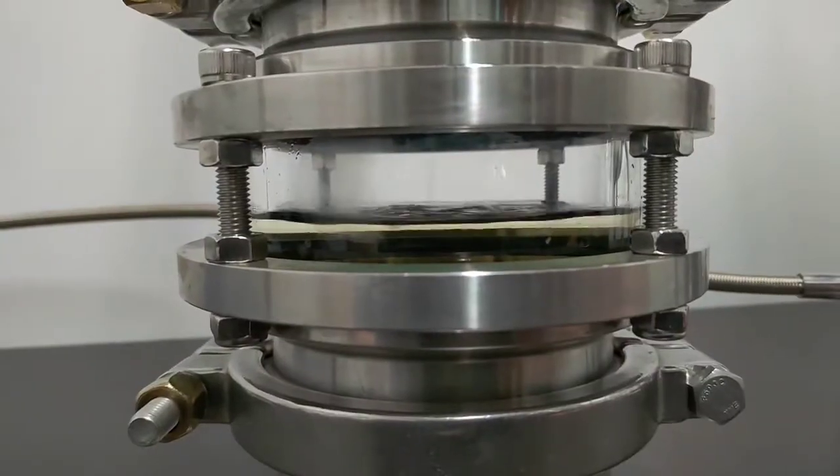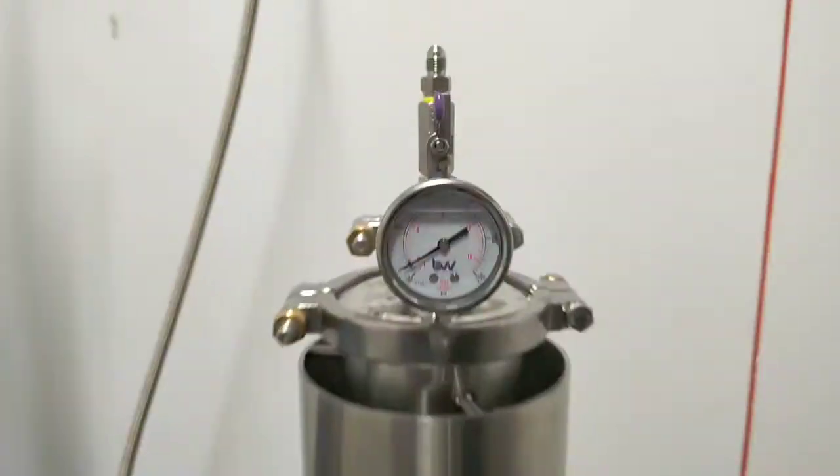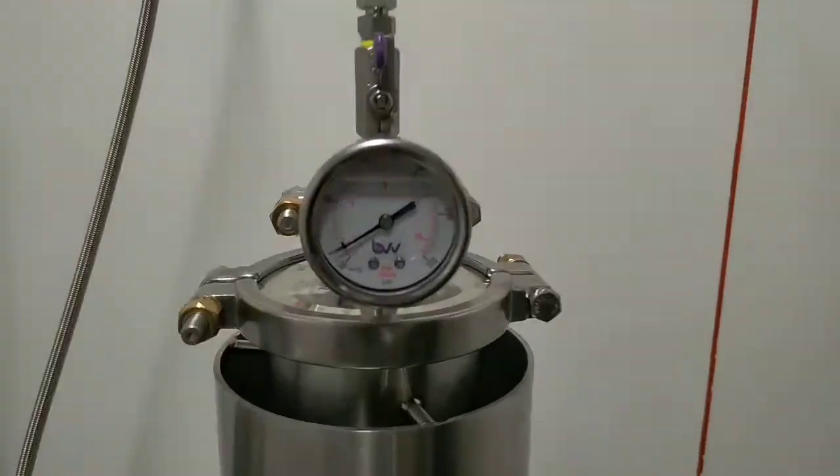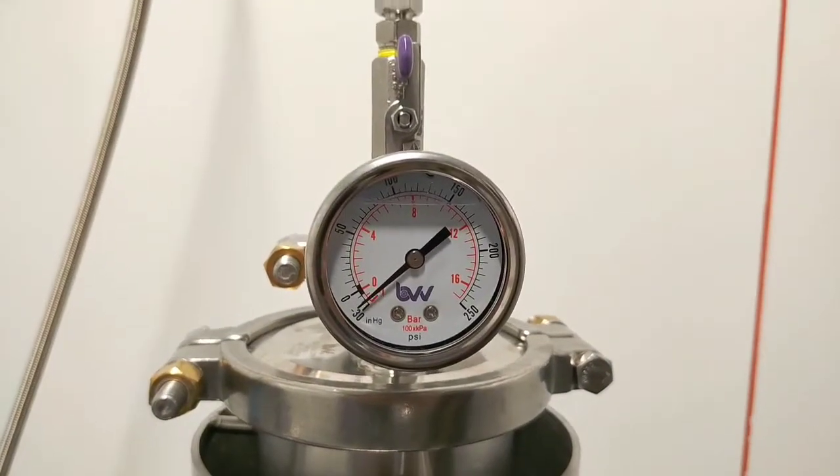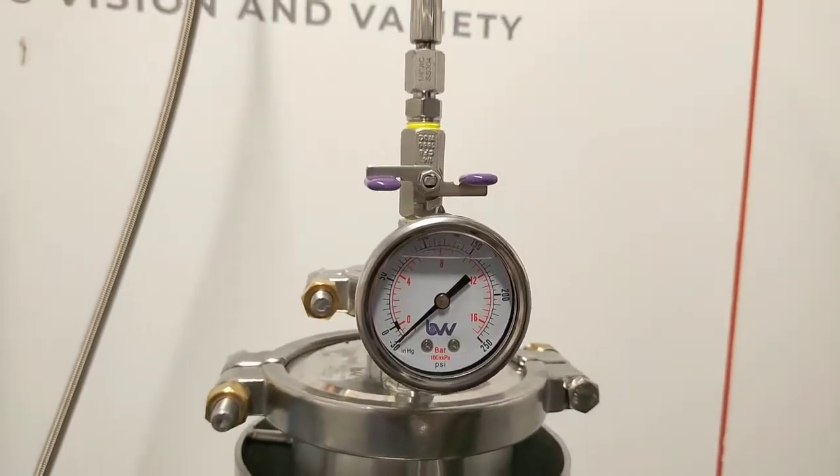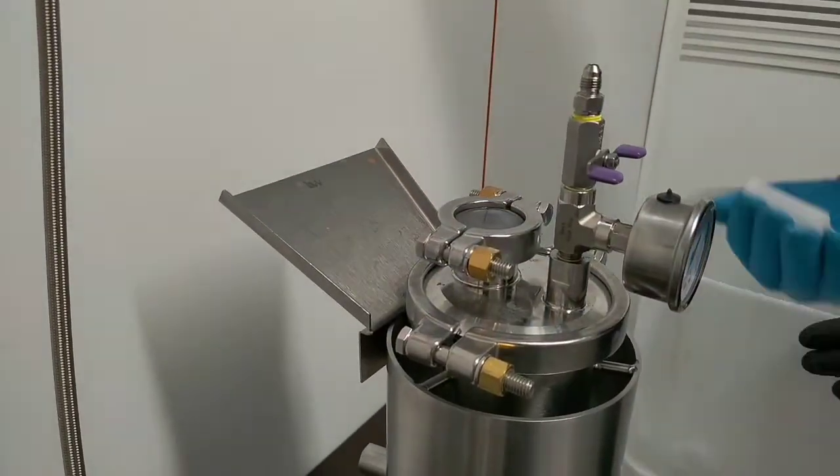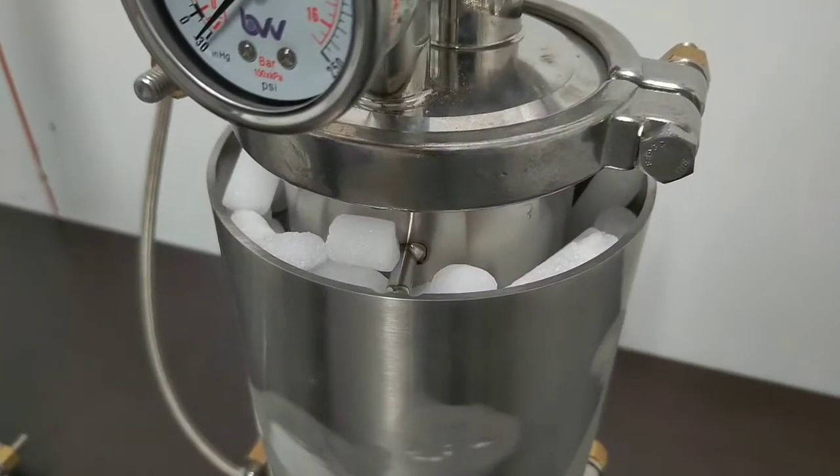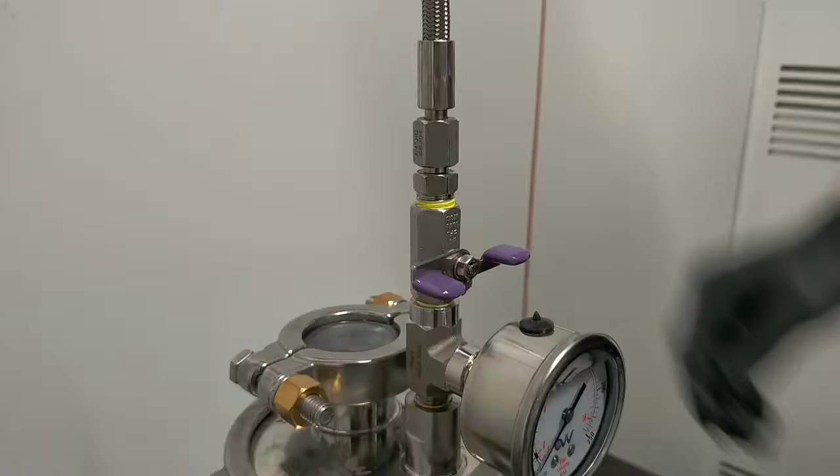Once the solvent tank is completely empty, purge it to atmosphere and pull the solvent tank under vacuum. Proceed to load the sleeve with dry ice, attach your recovery line, and tighten the line.